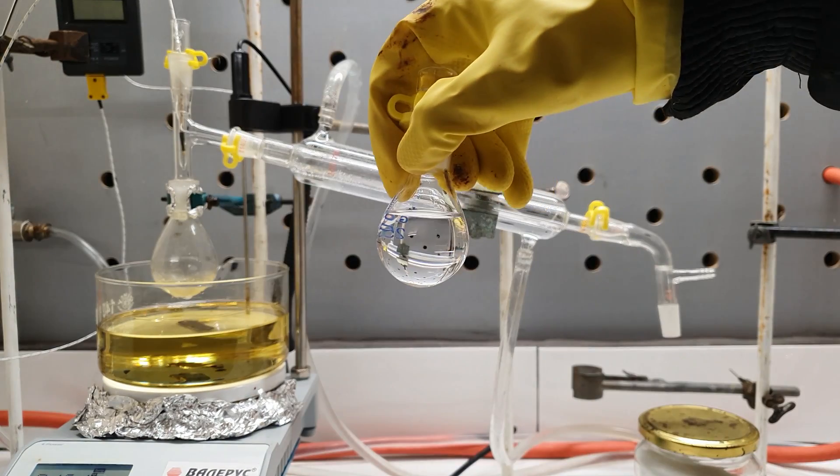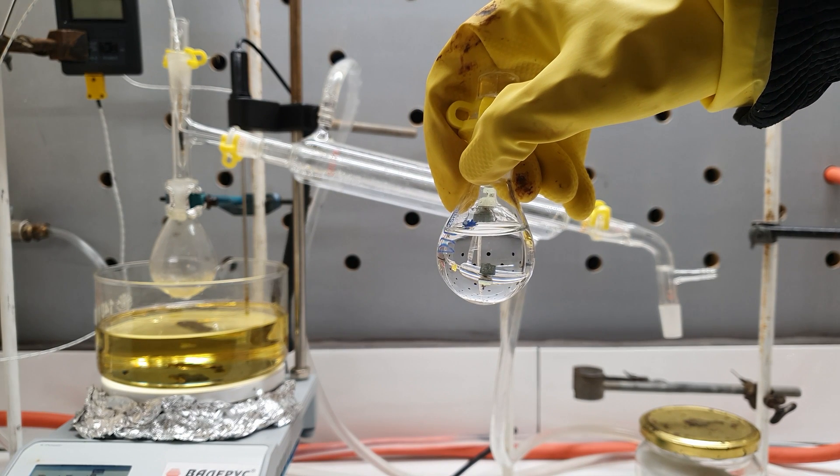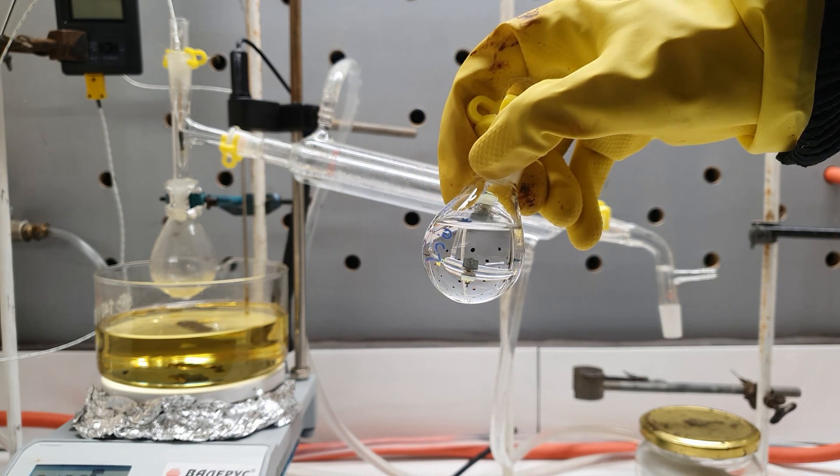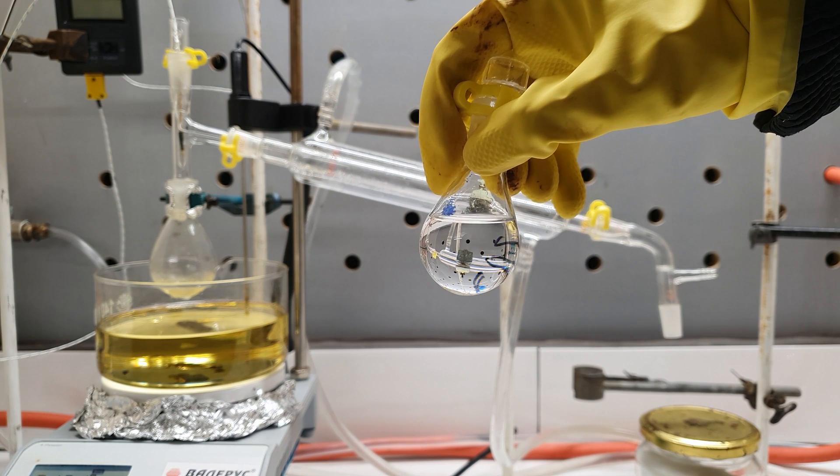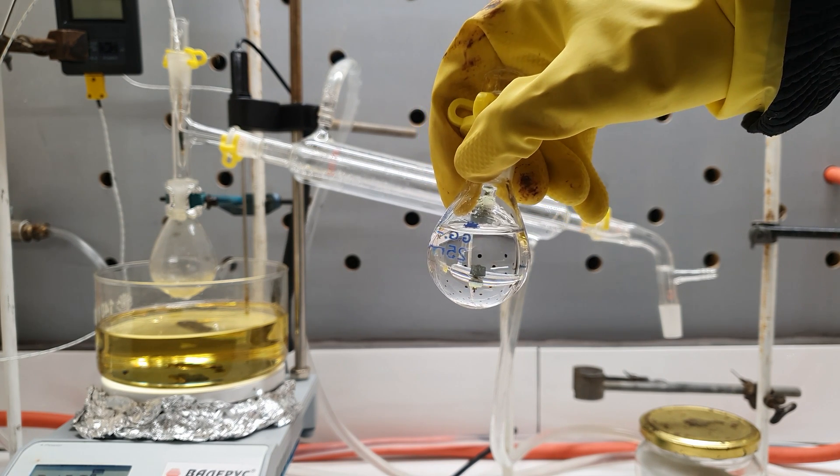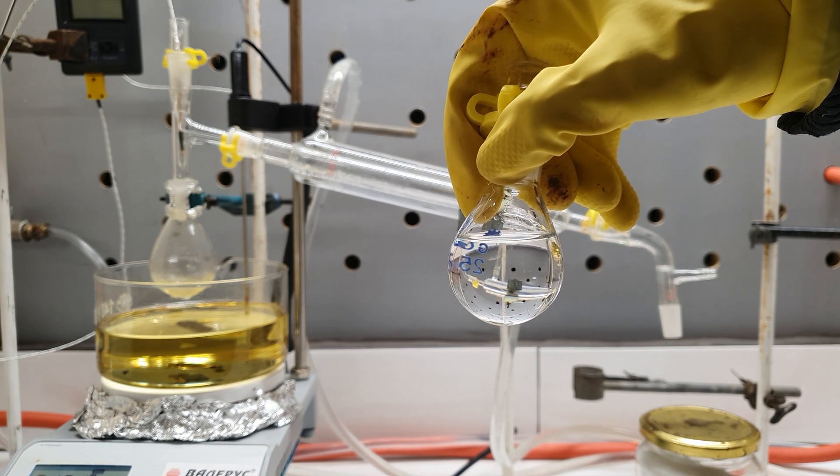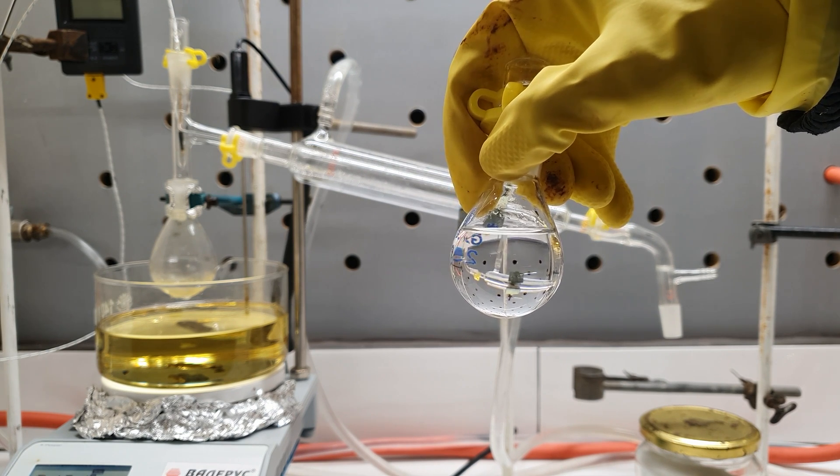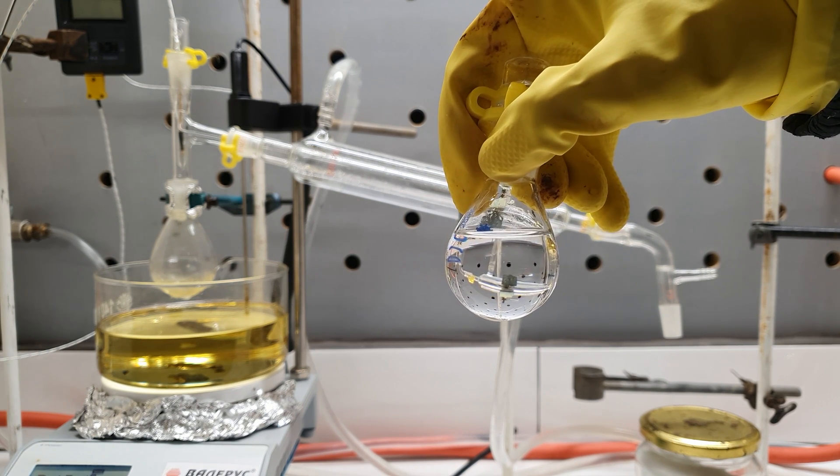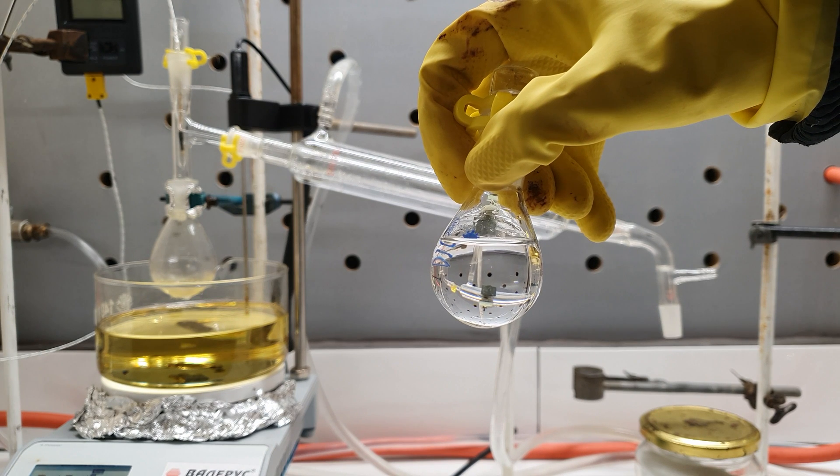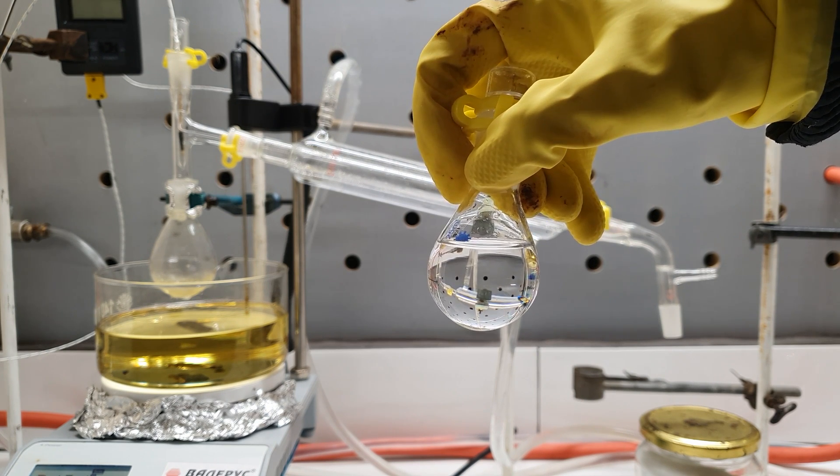And here is my final yield of 20 grams pure nitromethane. This corresponds to a percent yield of 31%, which honestly is quite low. However, the paper I was following suggested a yield of 42%, so it is probably the reaction not being very efficient.